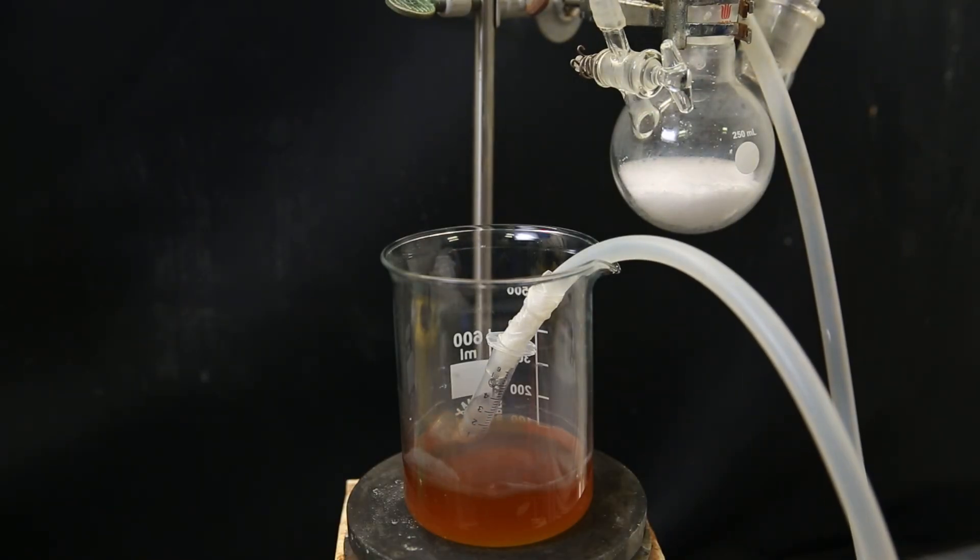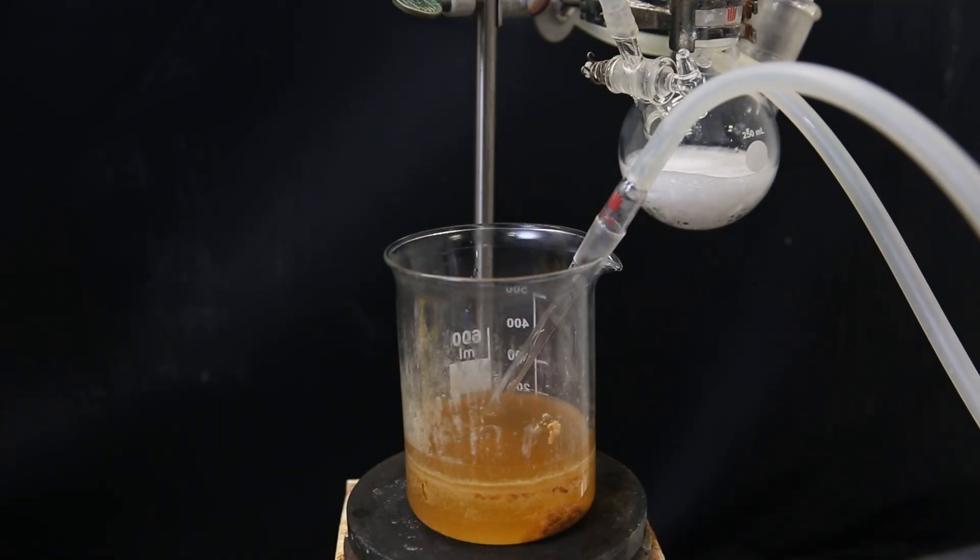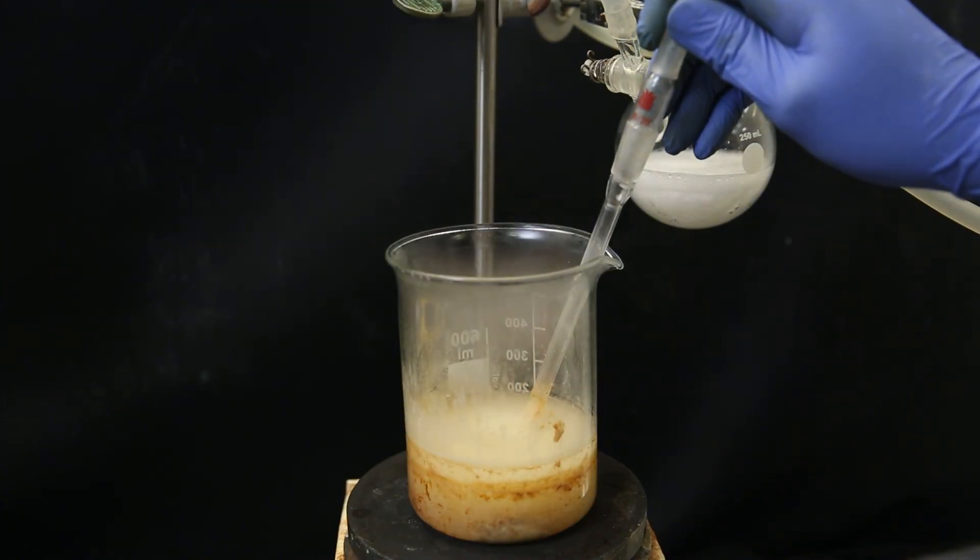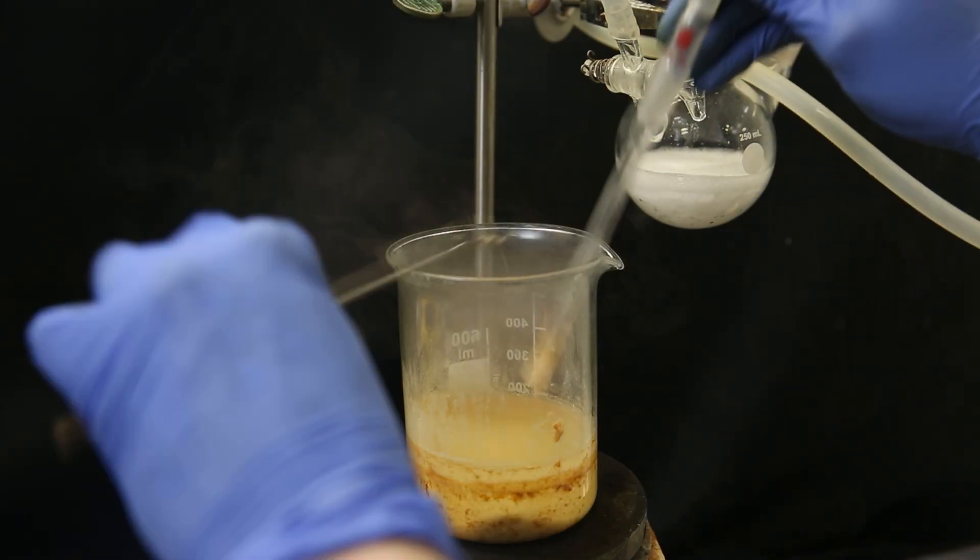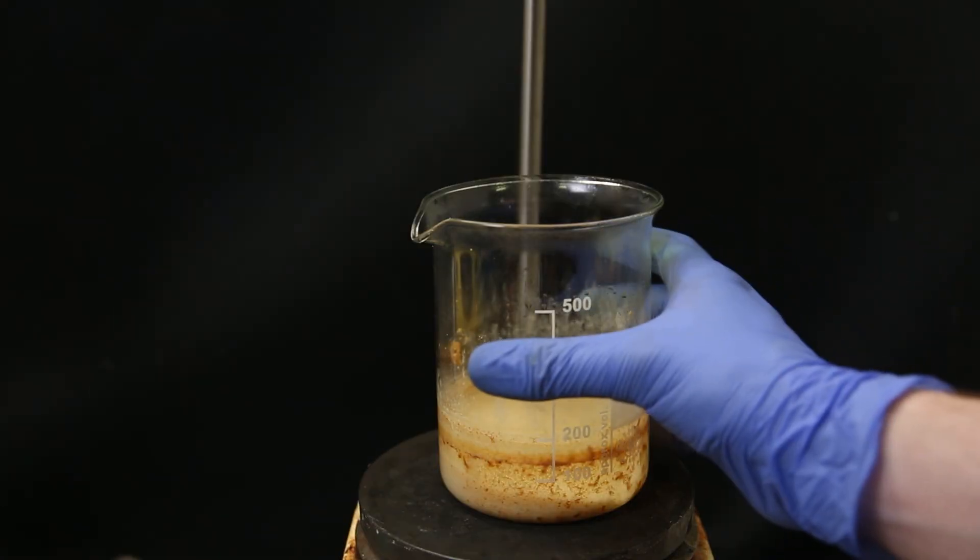Unfortunately the stuff that precipitates clogs the tube, so later I swapped it out for a glass one with a bigger hole, with a bigger diameter. It seems that first some impurity precipitated, because later on, it started to precipitate a more pure and white product. Either way, when nothing more precipitated, I stopped the reaction, and disassembled the gas generator.